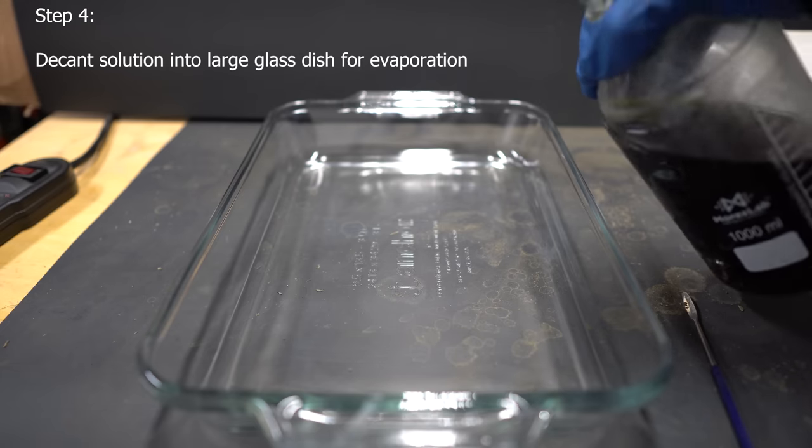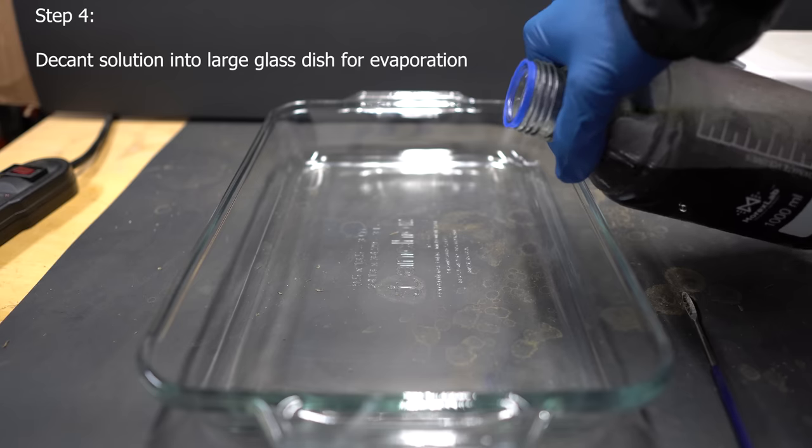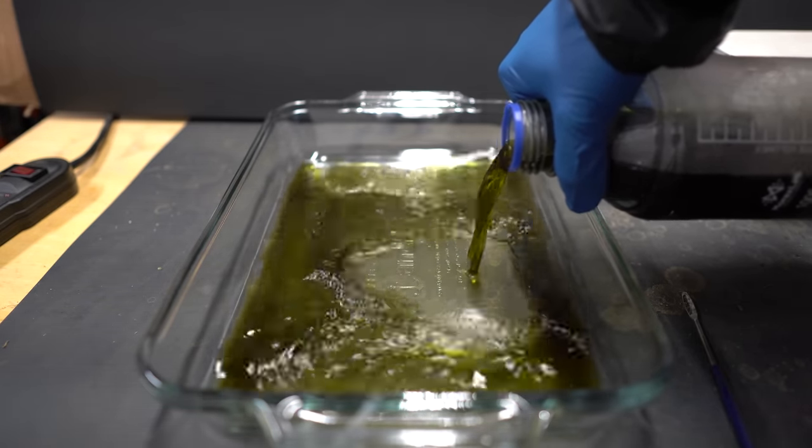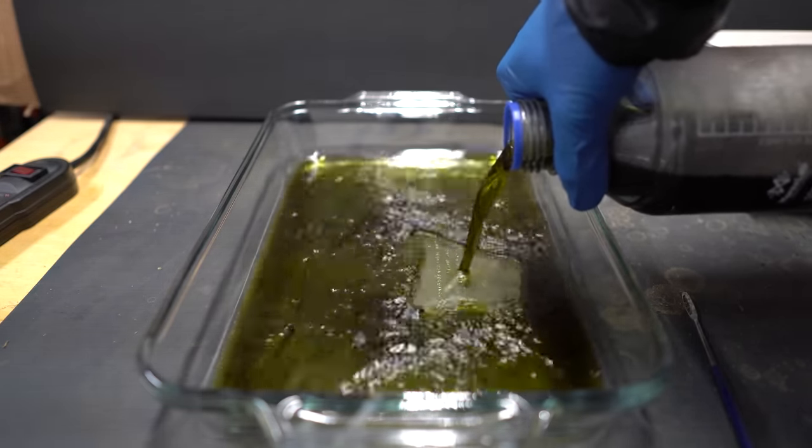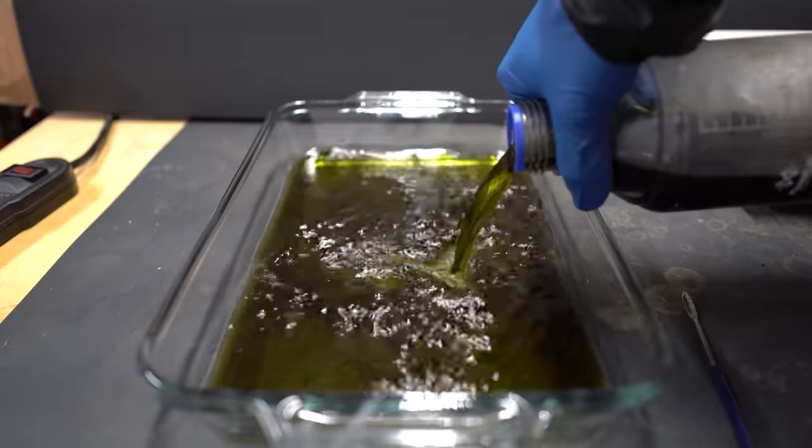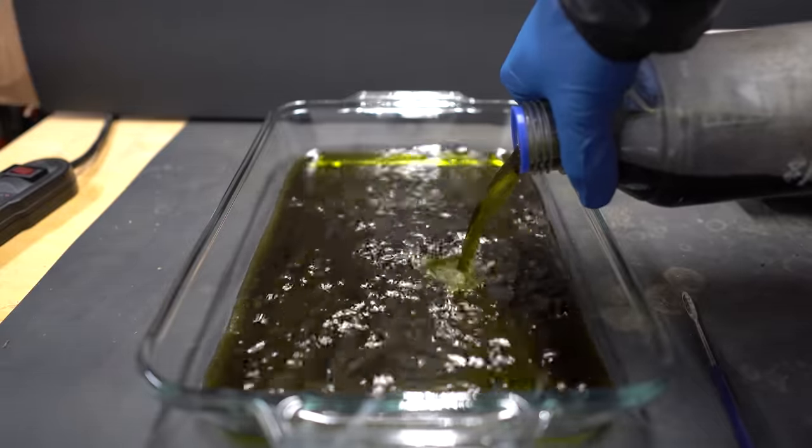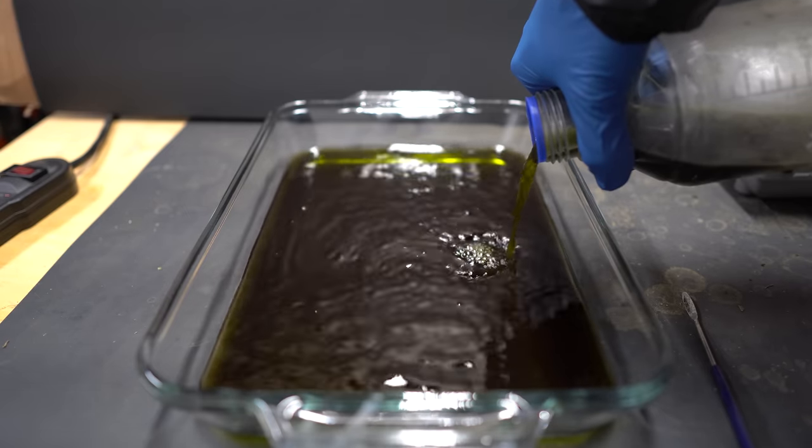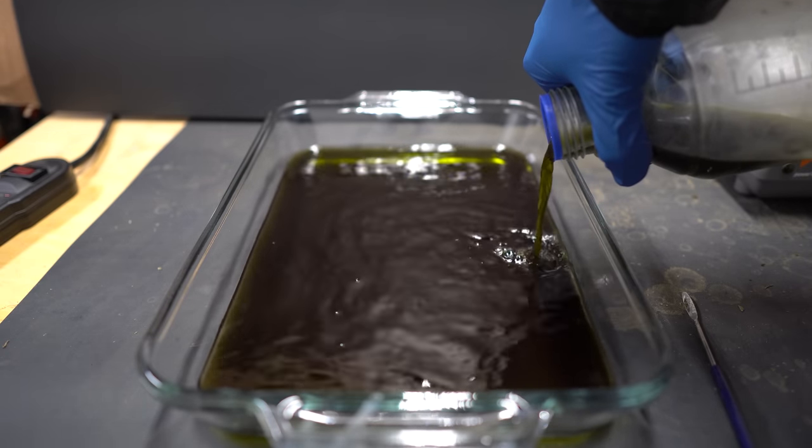What we're going to do now is let this stand overnight so any insoluble impurities fall to the bottom and we can decant the upper layer. I actually re-put mine into the freezer for the full 24 hours. Once it was done in the freezer for 24 hours, we're going to decant as much of the liquid as we can without stirring up the sediment.